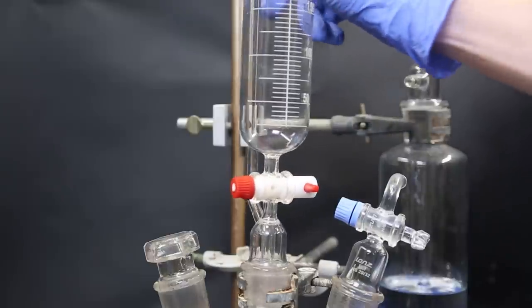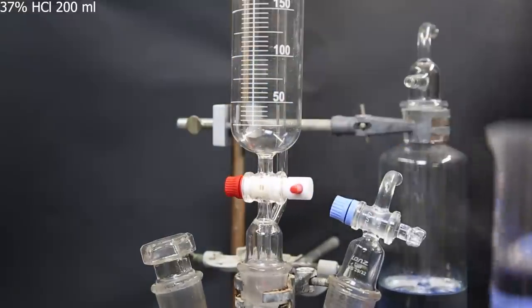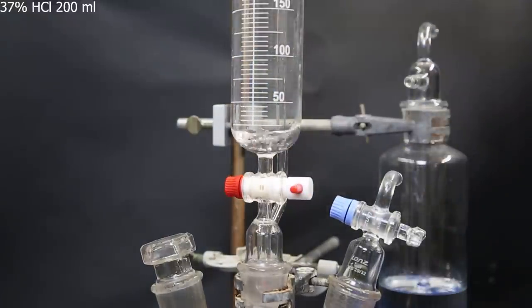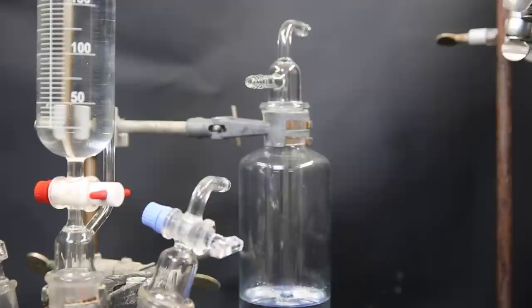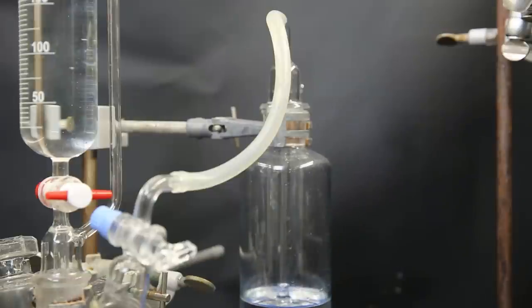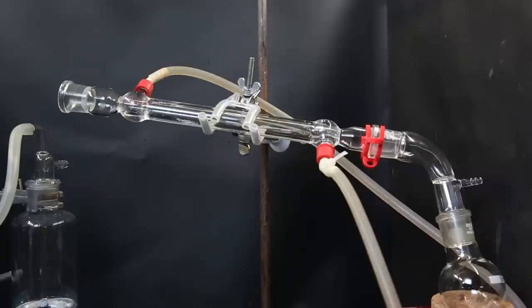Now I attach a dropping funnel on top, and pour in 200 mils with 37% hydrochloric acid. I then connect the gas adapter to the gas washing bottle. Now next to that, I set up part of a distillation apparatus with just the condenser, the curved vacuum receiver adapter, and a receiving flask. And through the condenser, I pump water that is heated to 80 degrees Celsius.